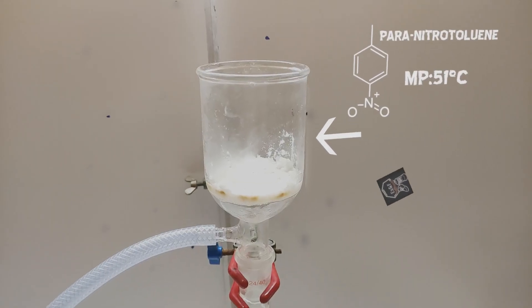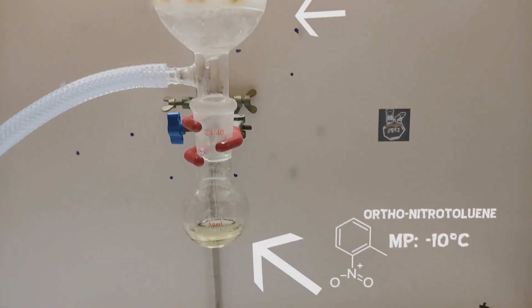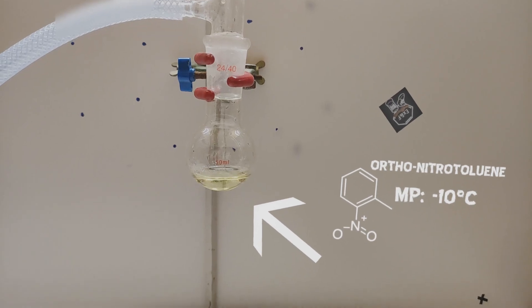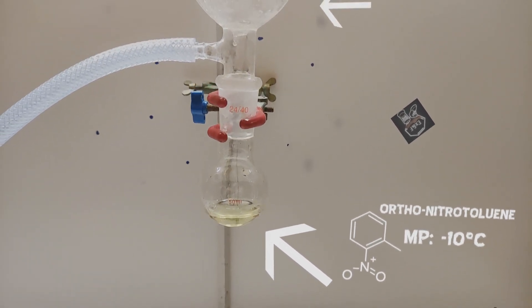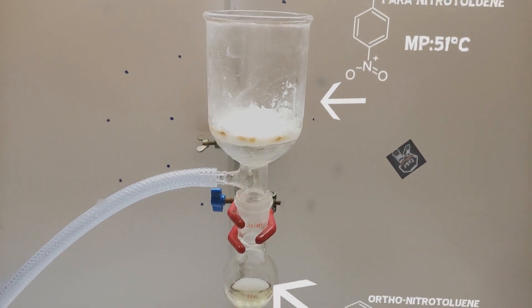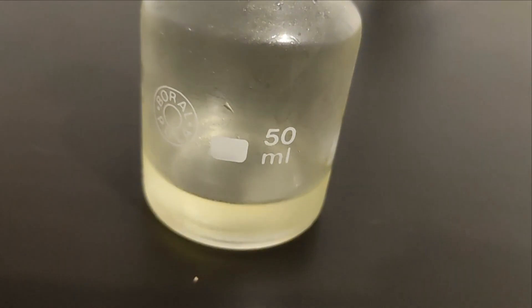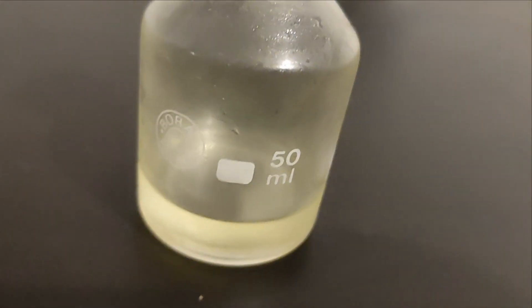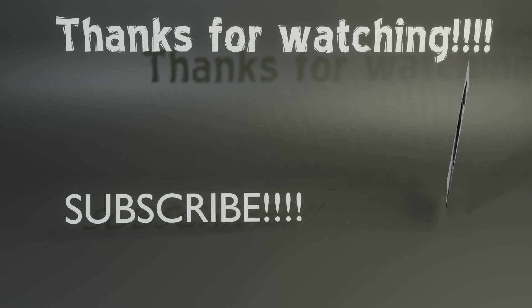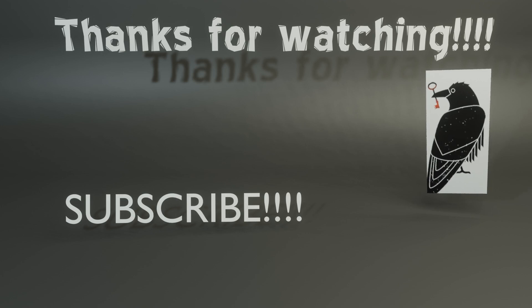The para-nitrotoluene will stay solid at room temperature, while the ortho-nitrotoluene will go through the filter. Sadly, this separation is not very good and there will be contamination in both. Our final yield is about 10 mL of a yellow liquid that does not freeze at minus 20. The para-nitrotoluene that was initially solid in the filter seems to have melted, and overall this reaction did not go very well. I still hope you enjoyed the video.